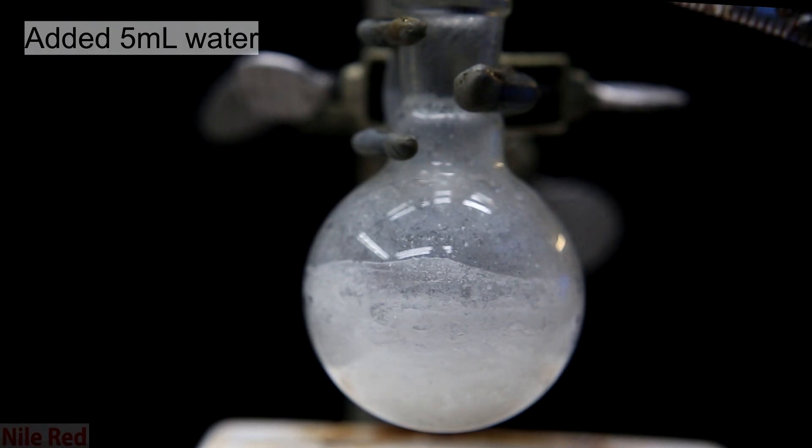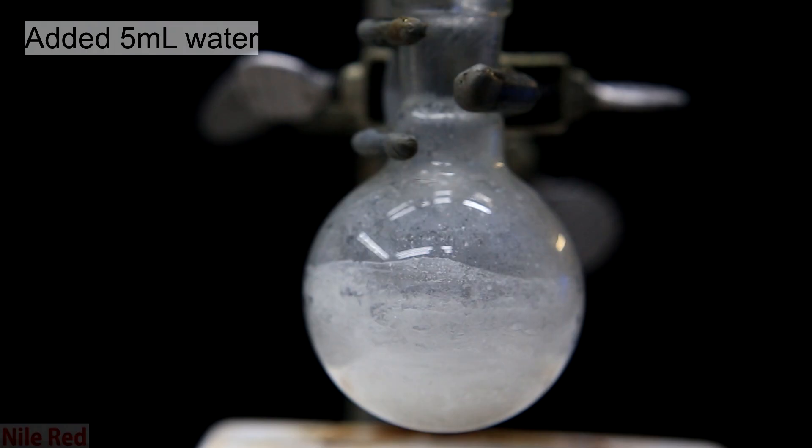To this crude mixture I pour in about 5 milliliters of water. The water will react with some of the water sensitive side products that are formed.